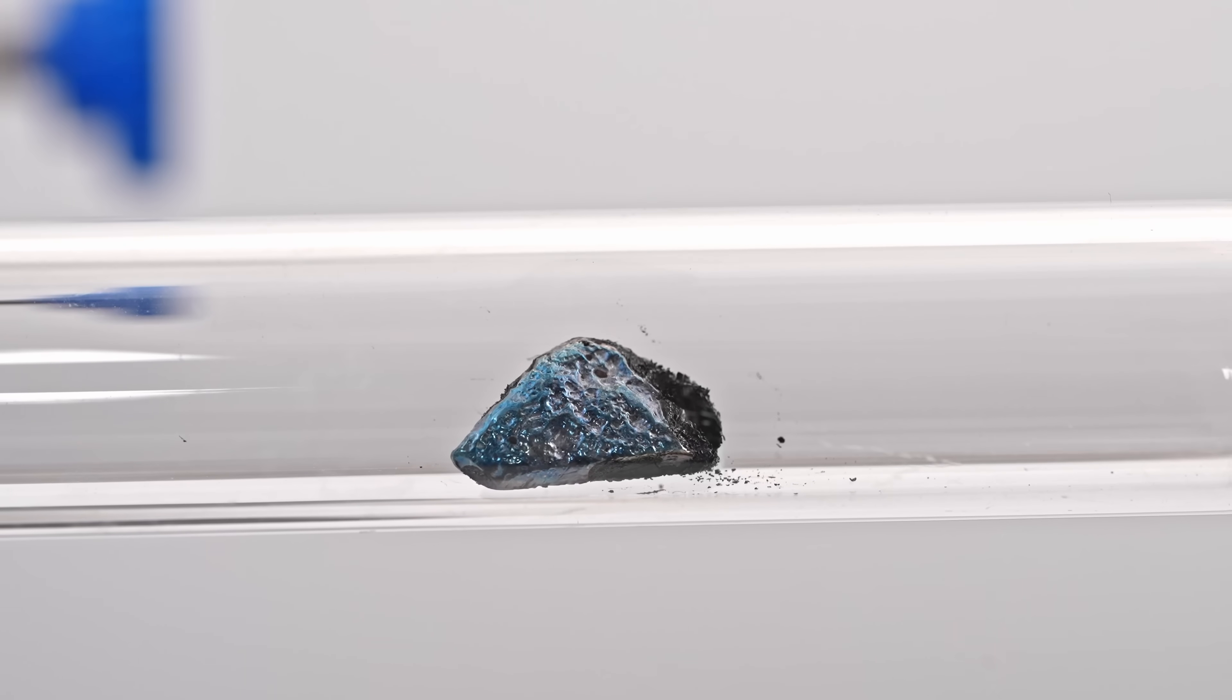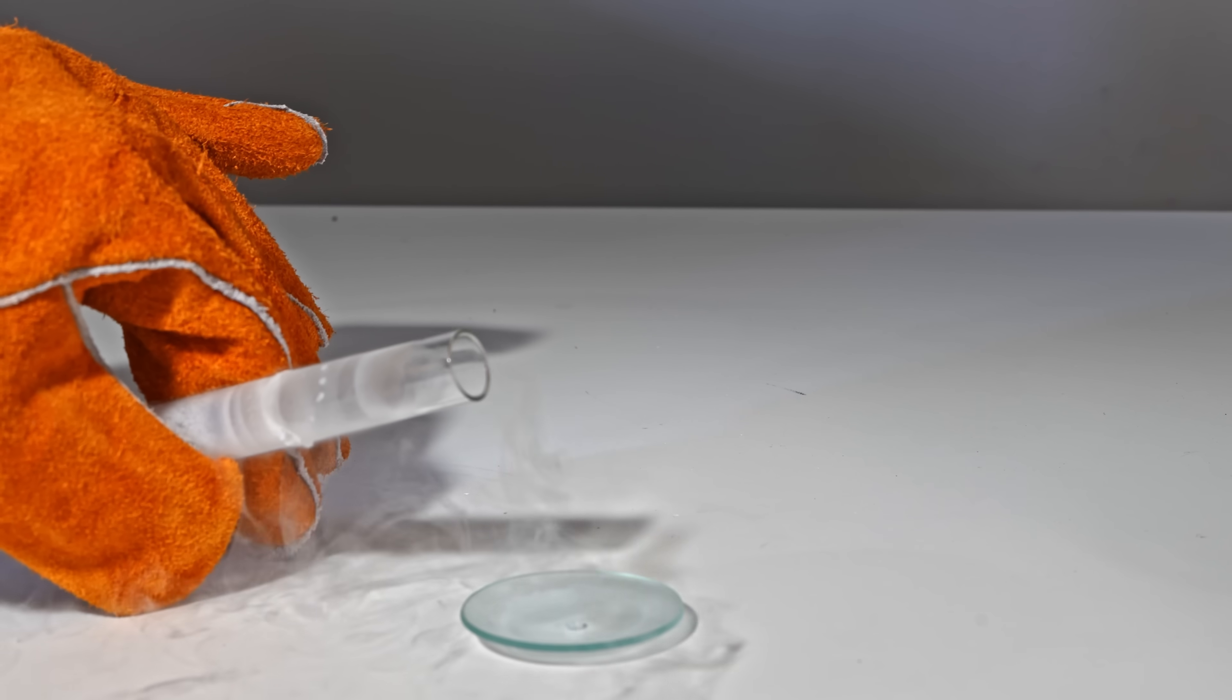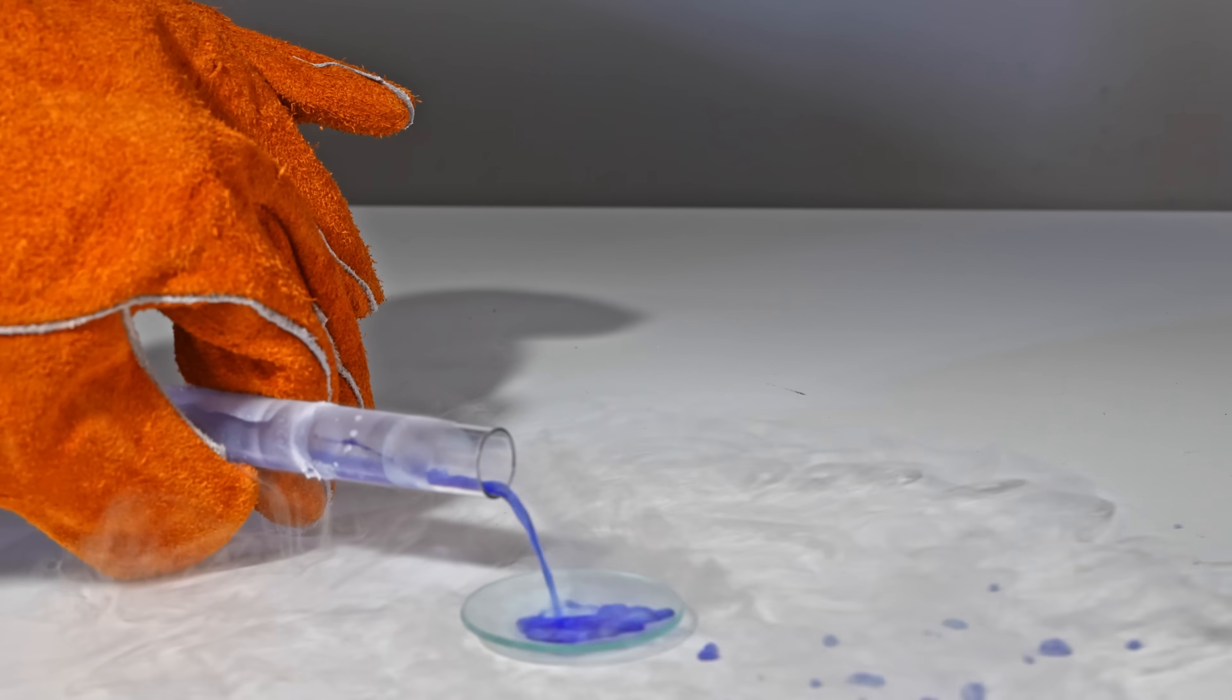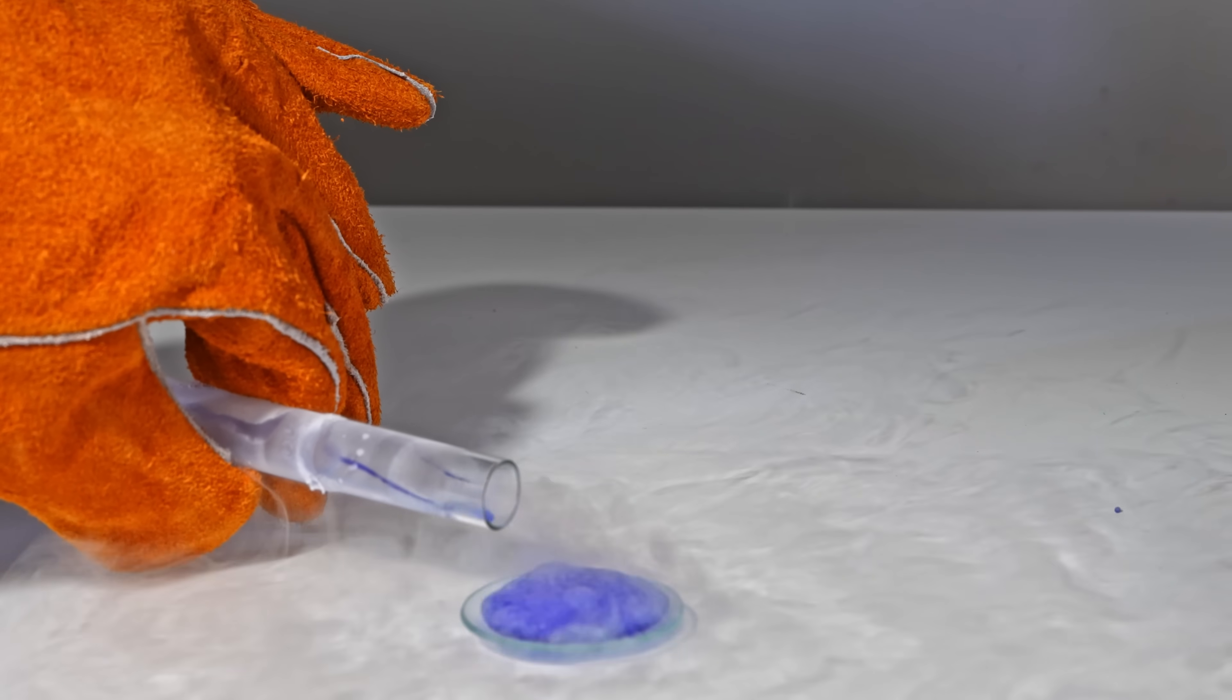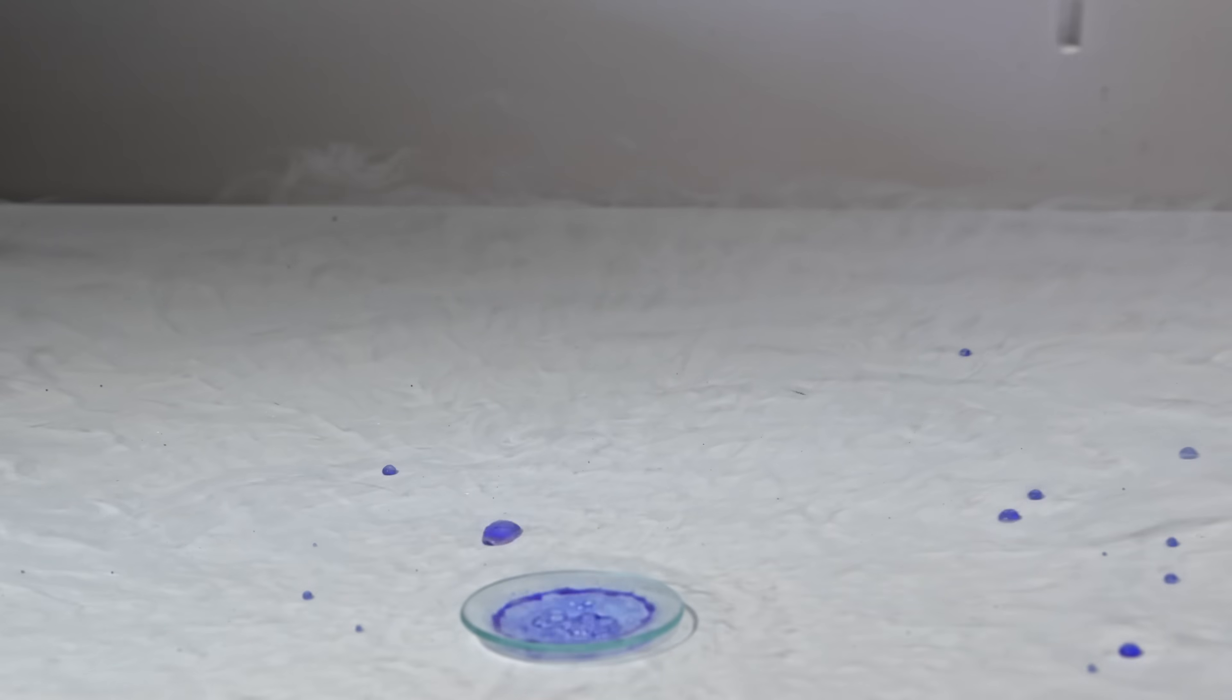For the reaction of anhydrous hydrazine in liquid ozone, I cooled the watch glass with liquid nitrogen so that the ozonated oxygen would not evaporate quickly. Once only a violet drop remains, I'll add a single drop of hydrazine.